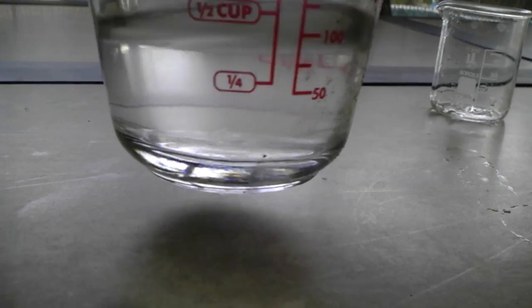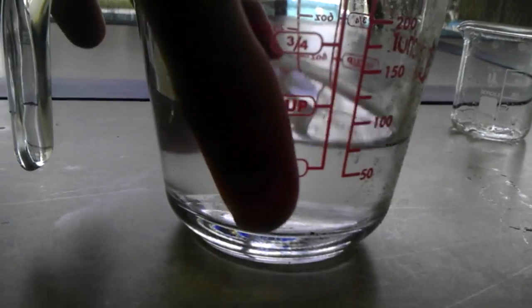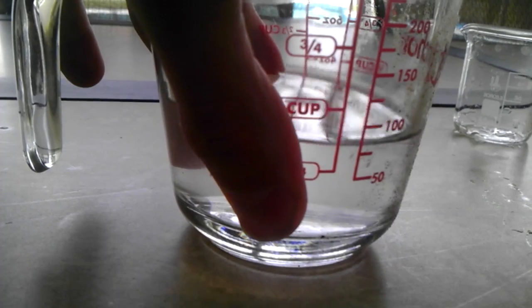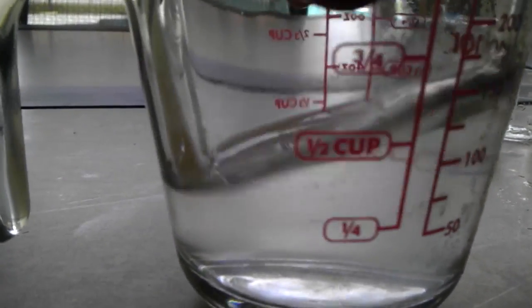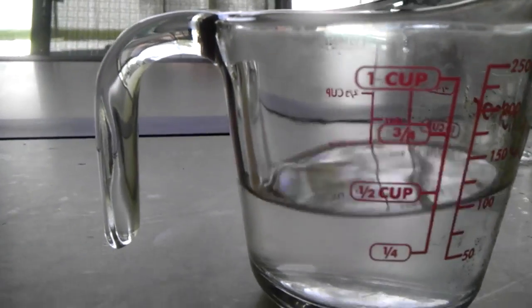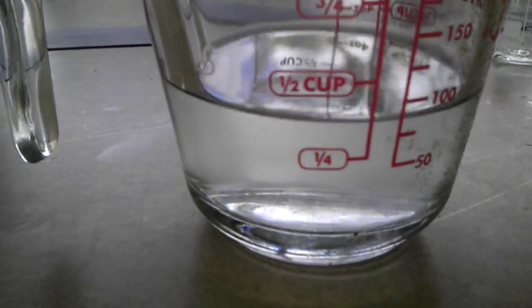So just stir this up. It's a pretty exothermic reaction — you can feel it, it gets rather hot. Then just waft it, and you want to smell ammonia. That was really strong ammonia. Oh my gosh.